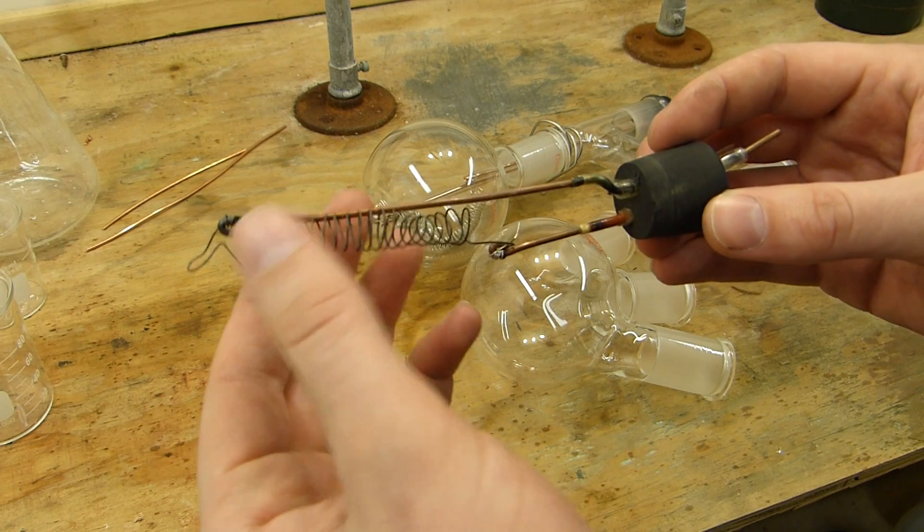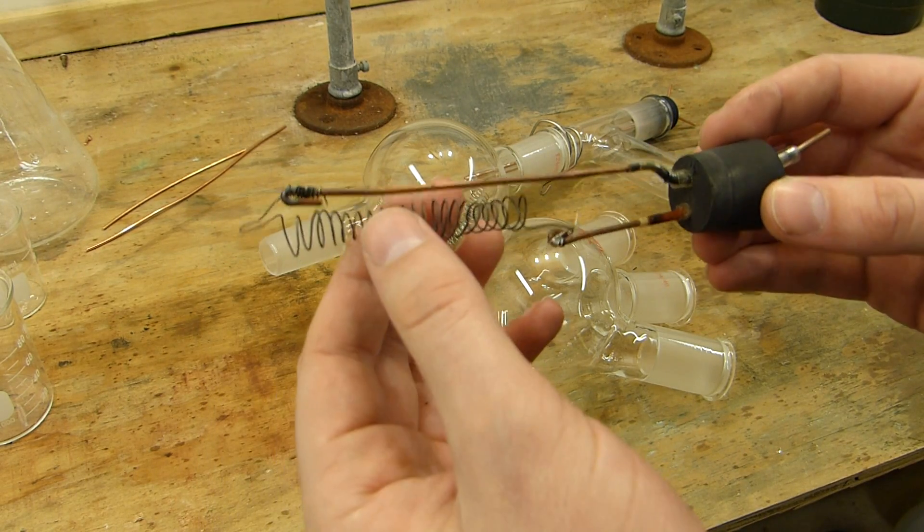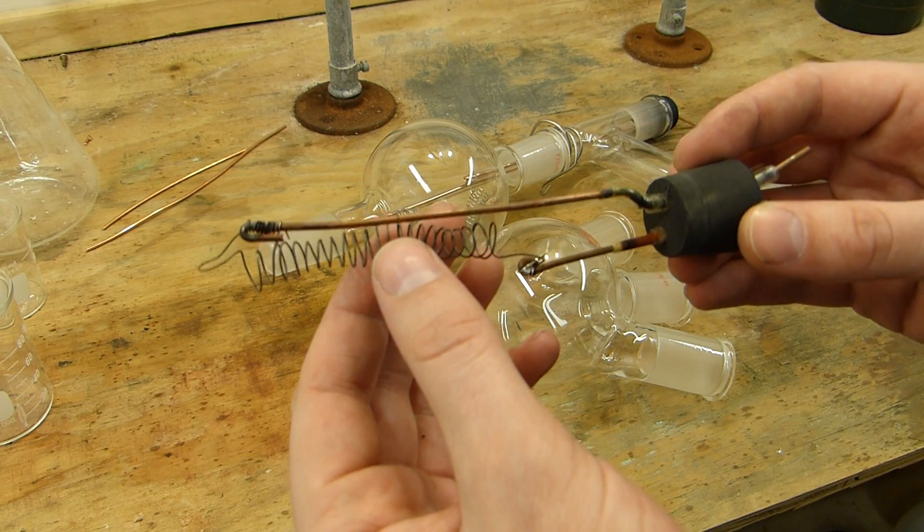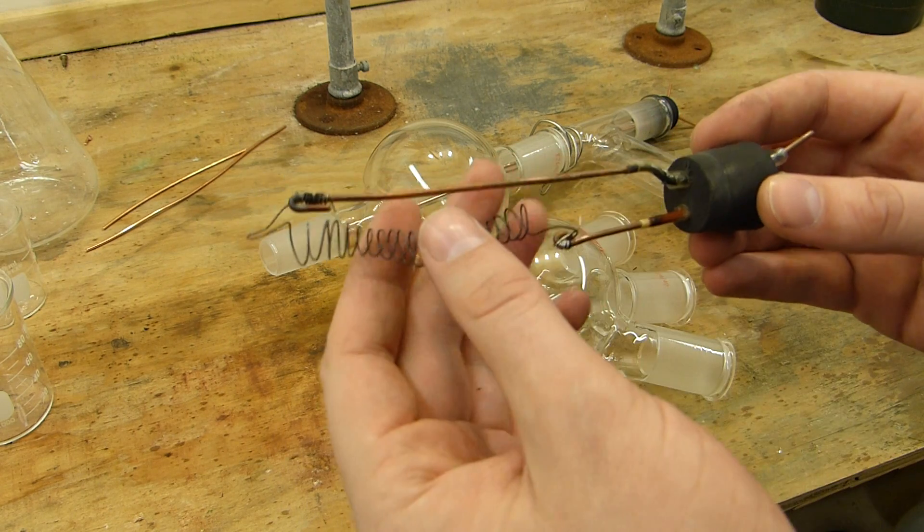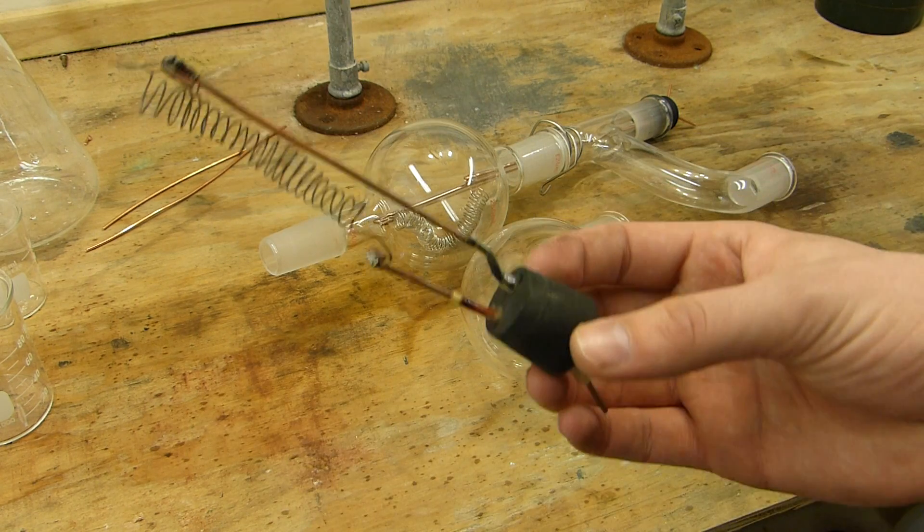Also, you might notice that you can see the filament currently is caught on this and it's touching the wire here. So that's obviously not good. That'll cause a short. It'll burn out the nichrome. I just drive this with a Variac, by the way.